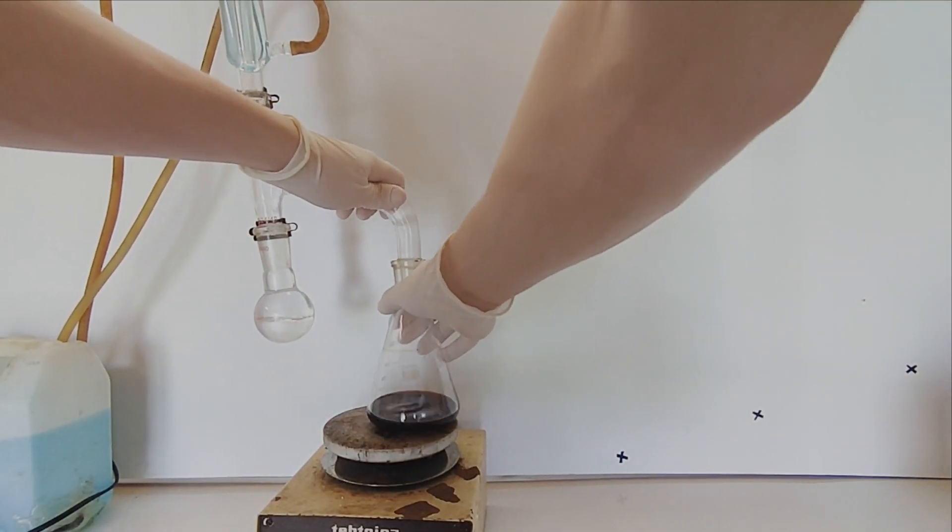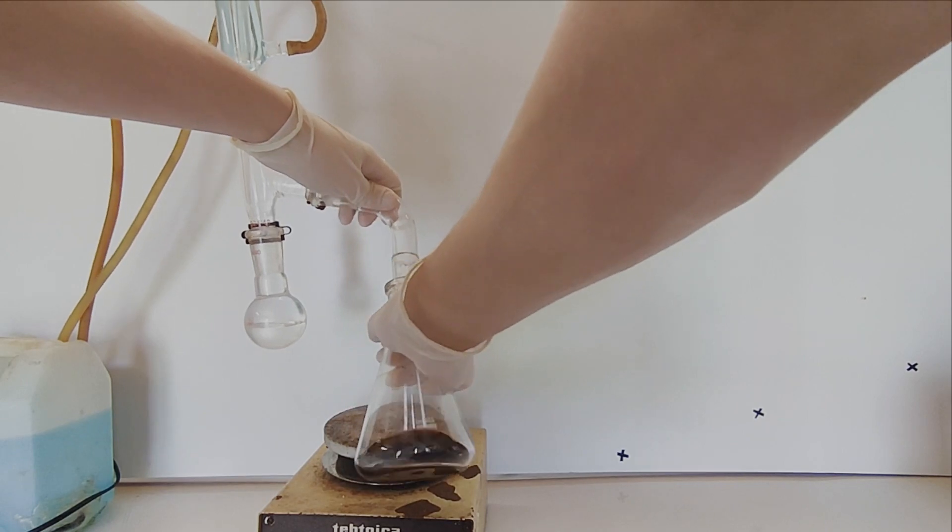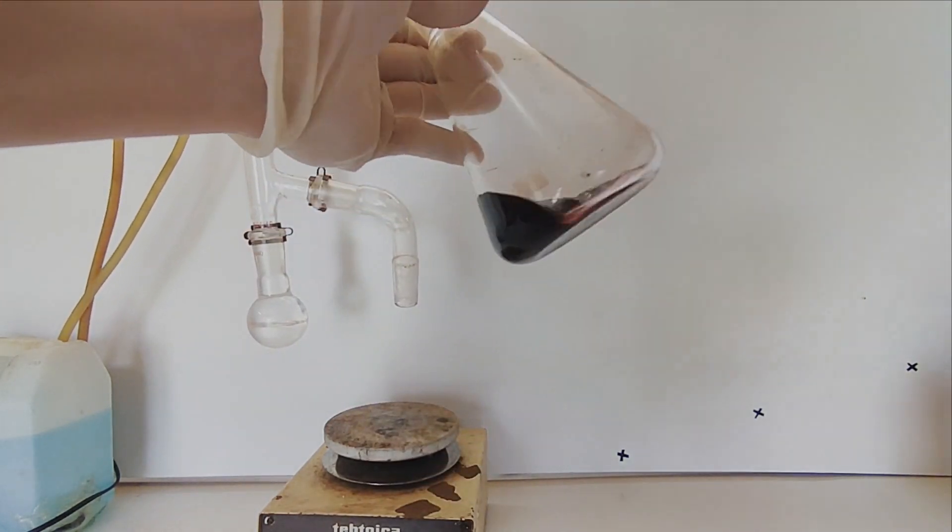After no more water is collected in the bottom of the trap, the reaction is stopped and neutralized with sodium bicarbonate.